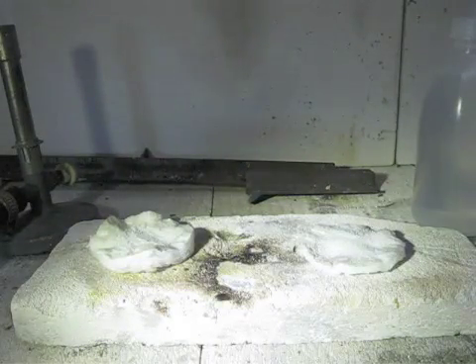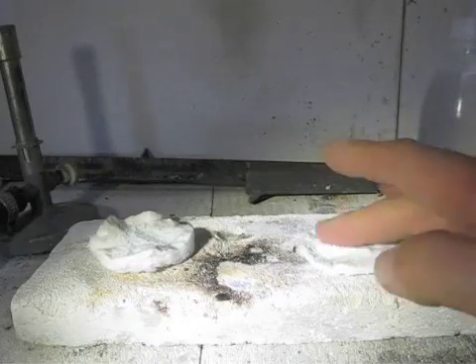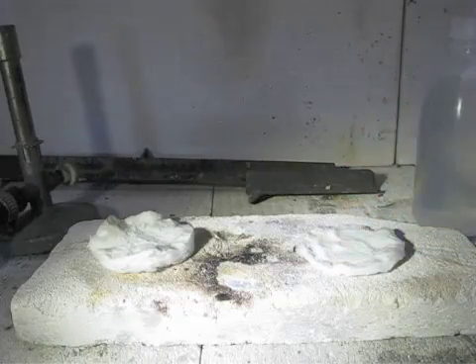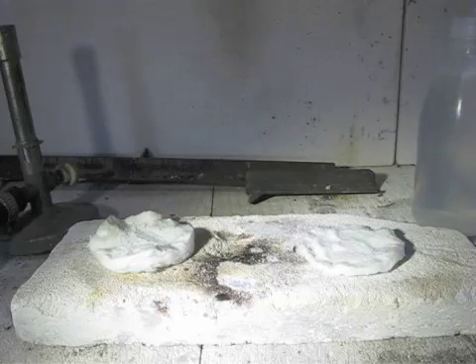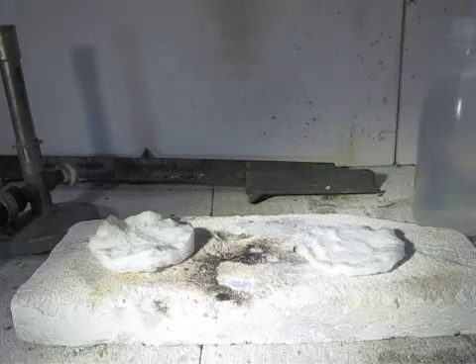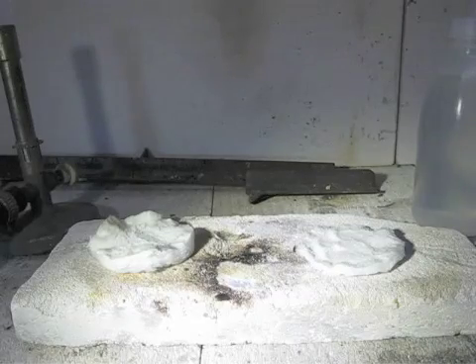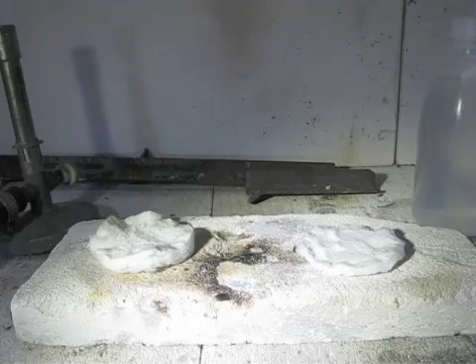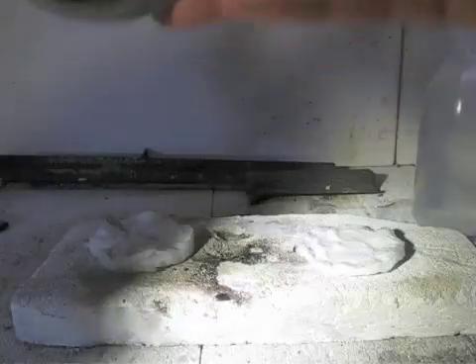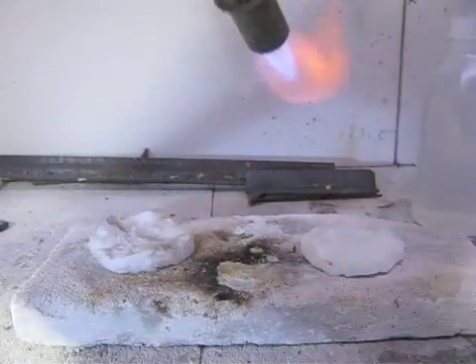Now I will spread it over the piece of cellulose and I start. I will blow a flame over it — with the nitrate.